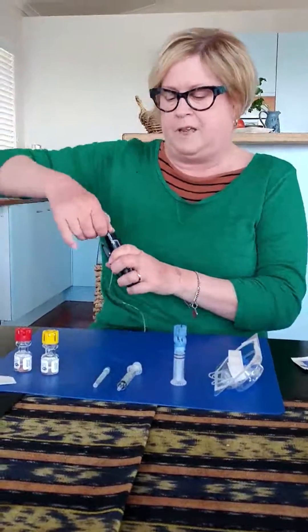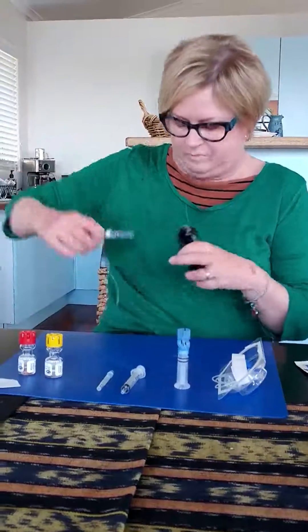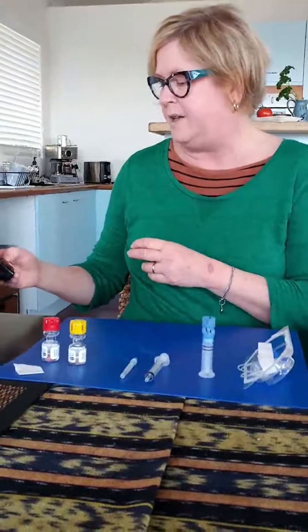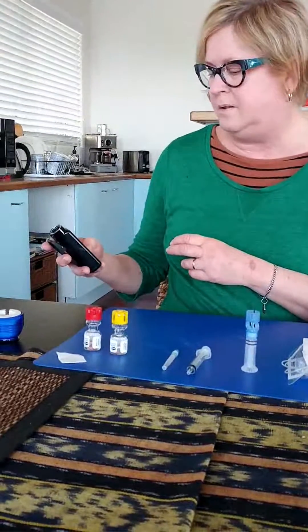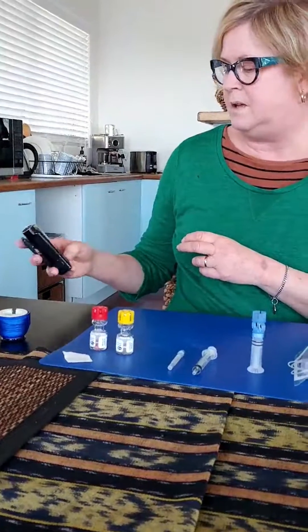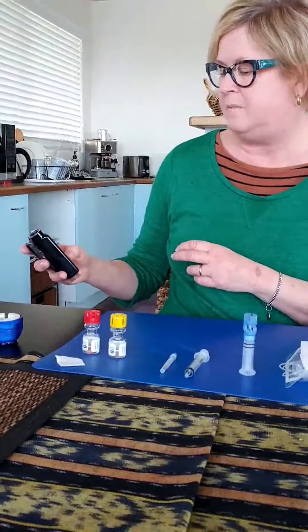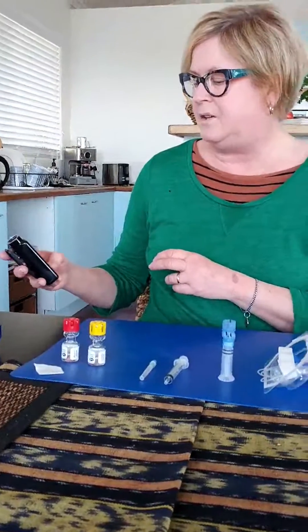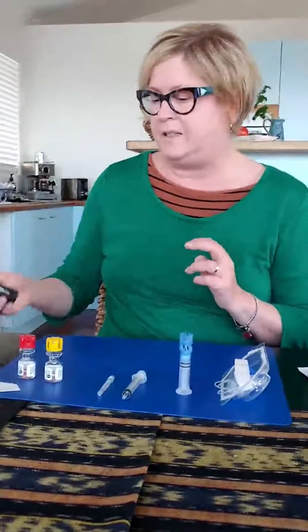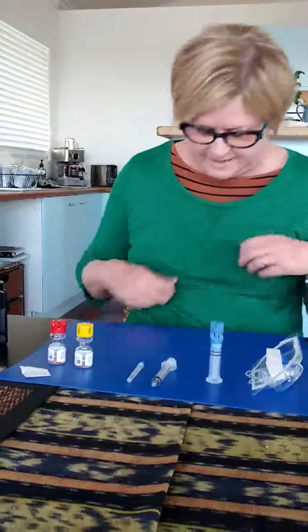So now I'm going to take my pump off and unscrew the old reservoir. I'll just leave that sit there and I'll just rewind that now. Go to menu, unlock, reservoir and tubing, select, new reservoir, select and rewind button. So that's just now rewinding, getting ready for everything.